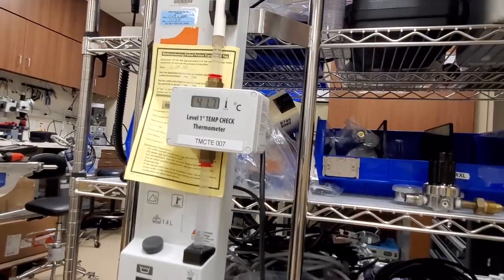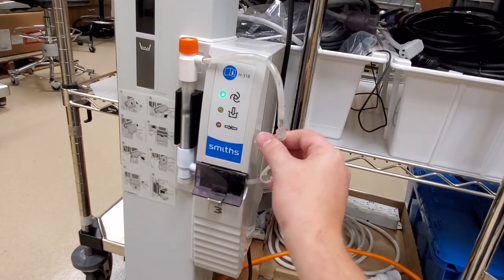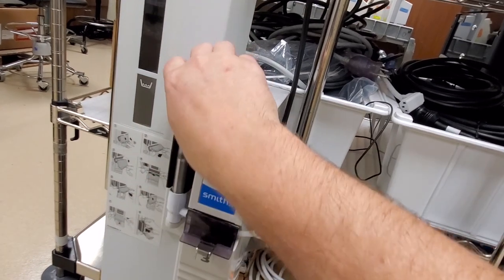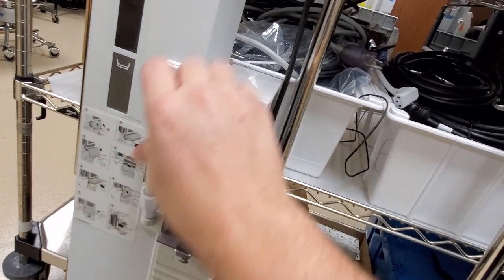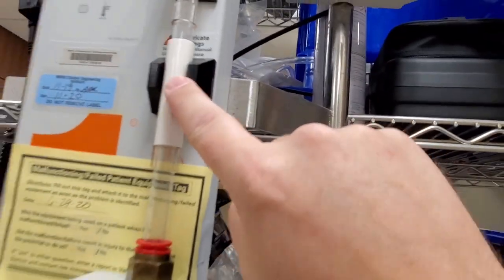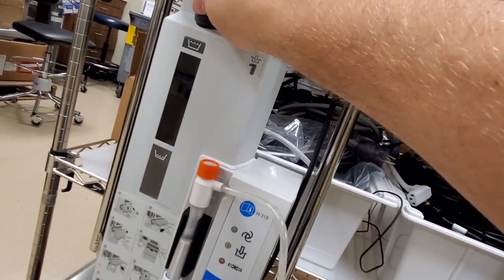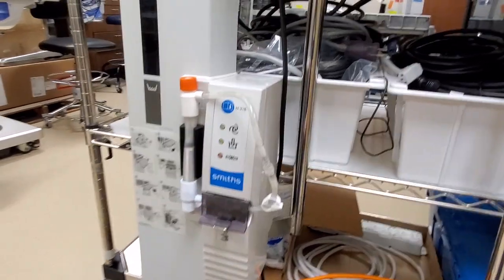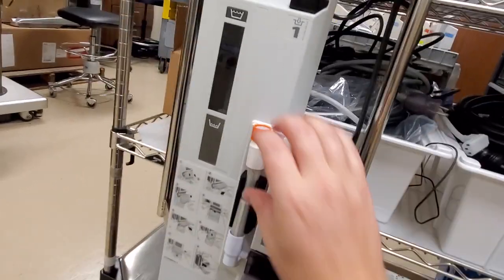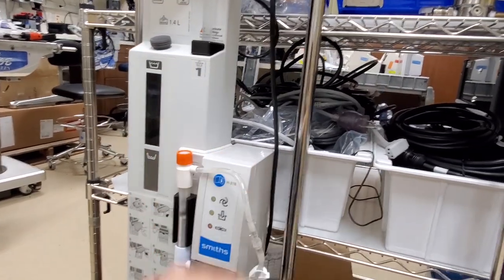You can see right here, I've got the thermometer in line and I have a little closed loop test jig down here. There's a micro switch right here. See that little guy? So there's a micro switch and then there's a micro switch right up in here in this guy. And you can see, I just made it very upset. So it's going to do a check on the line, okay, push this guy in and it will auto cycle and it will start feeding.